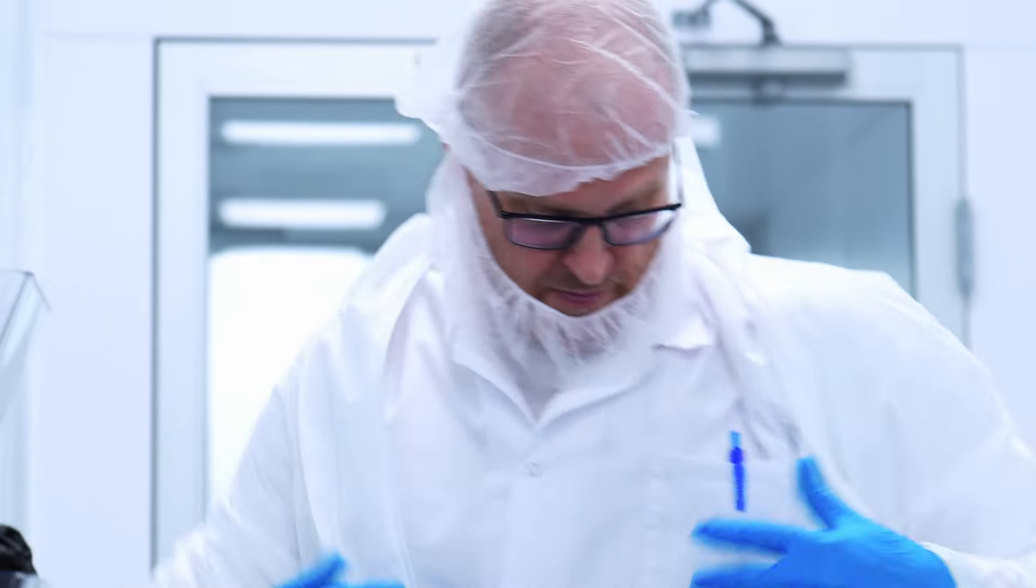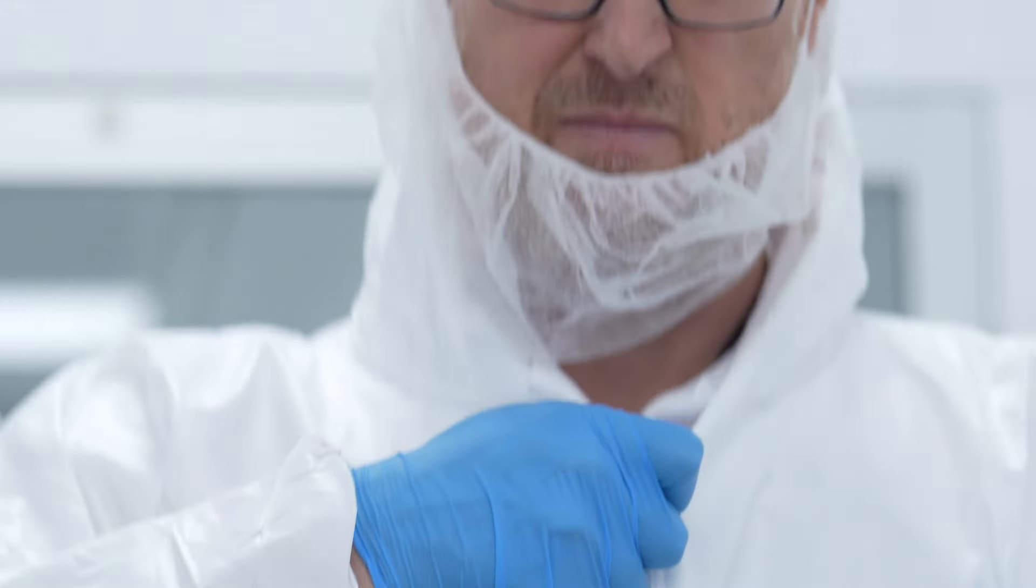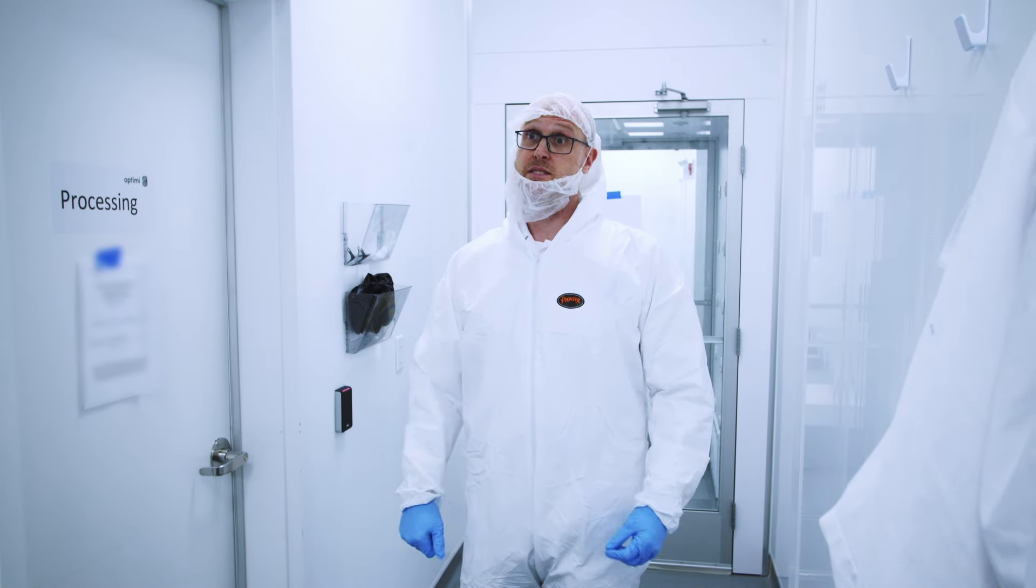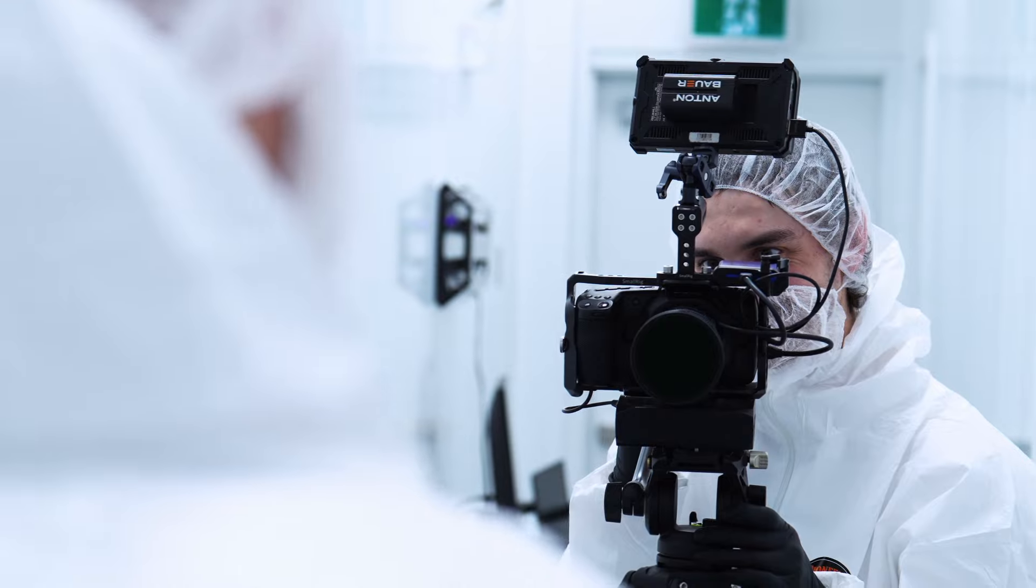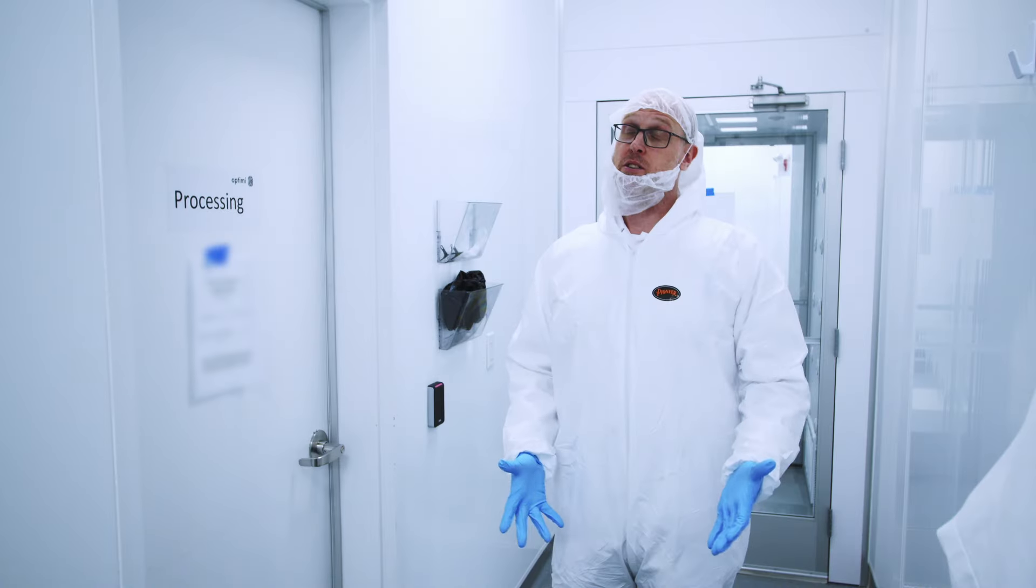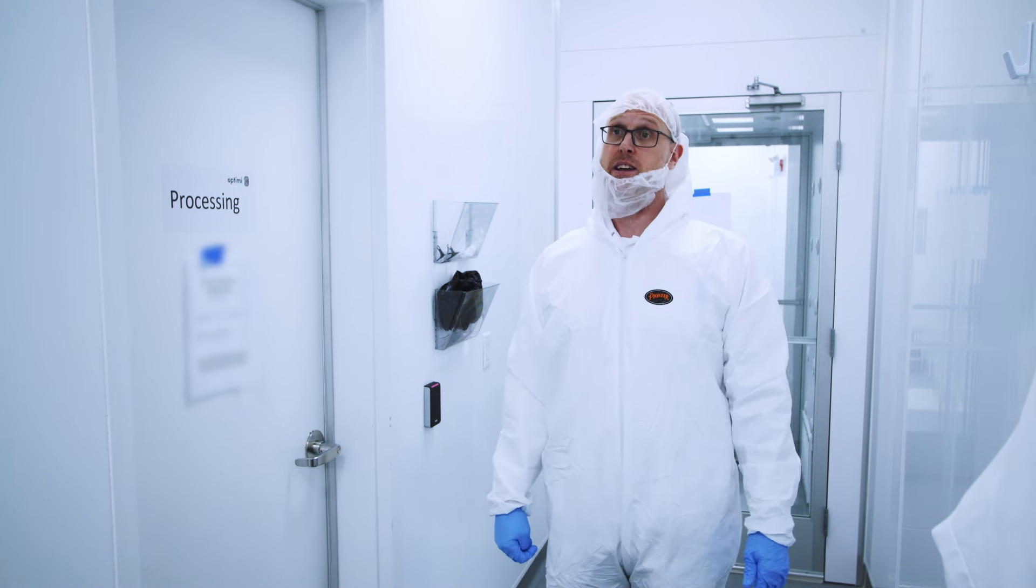So you'll notice that we are dressed a little bit differently now. That's because we are actually in our GMP area. Part of the process of GMP is ensuring that everything is ultra clean. Everybody behind the camera is dressed exactly the same way as I am. Right now we are going to show you our GMP encapsulation procedure that is being utilized to formulate capsules that will be used for human consumption.